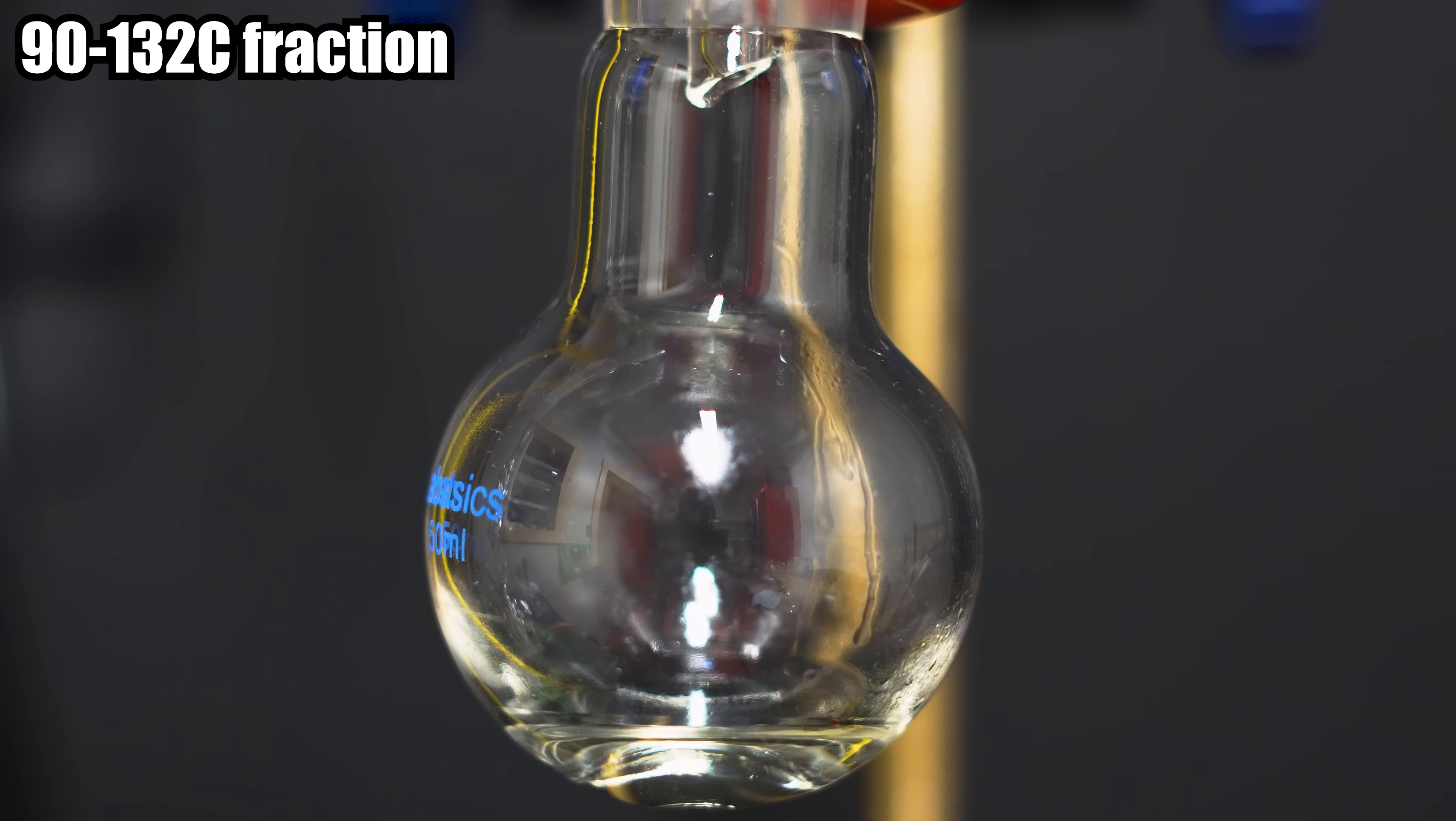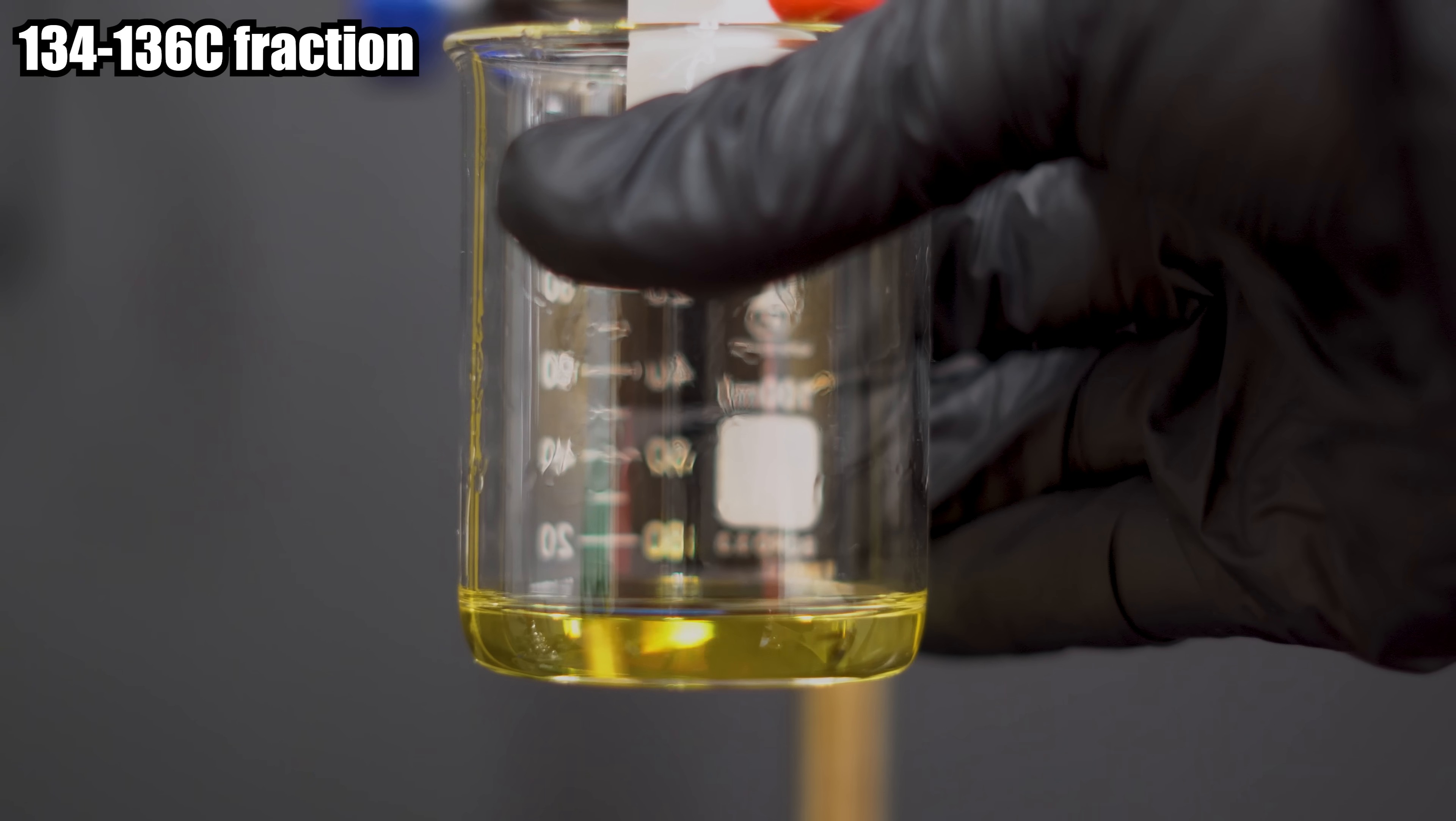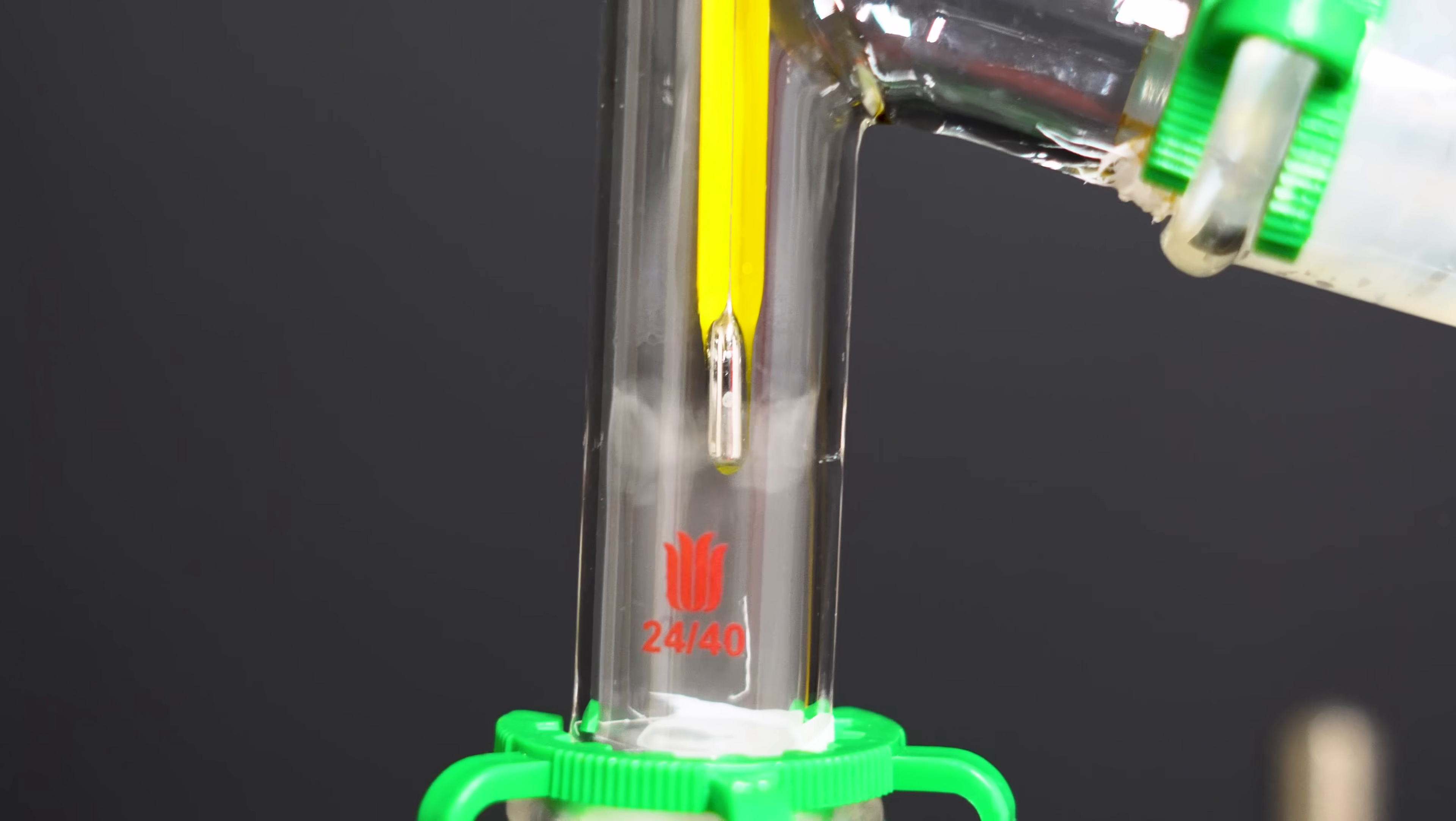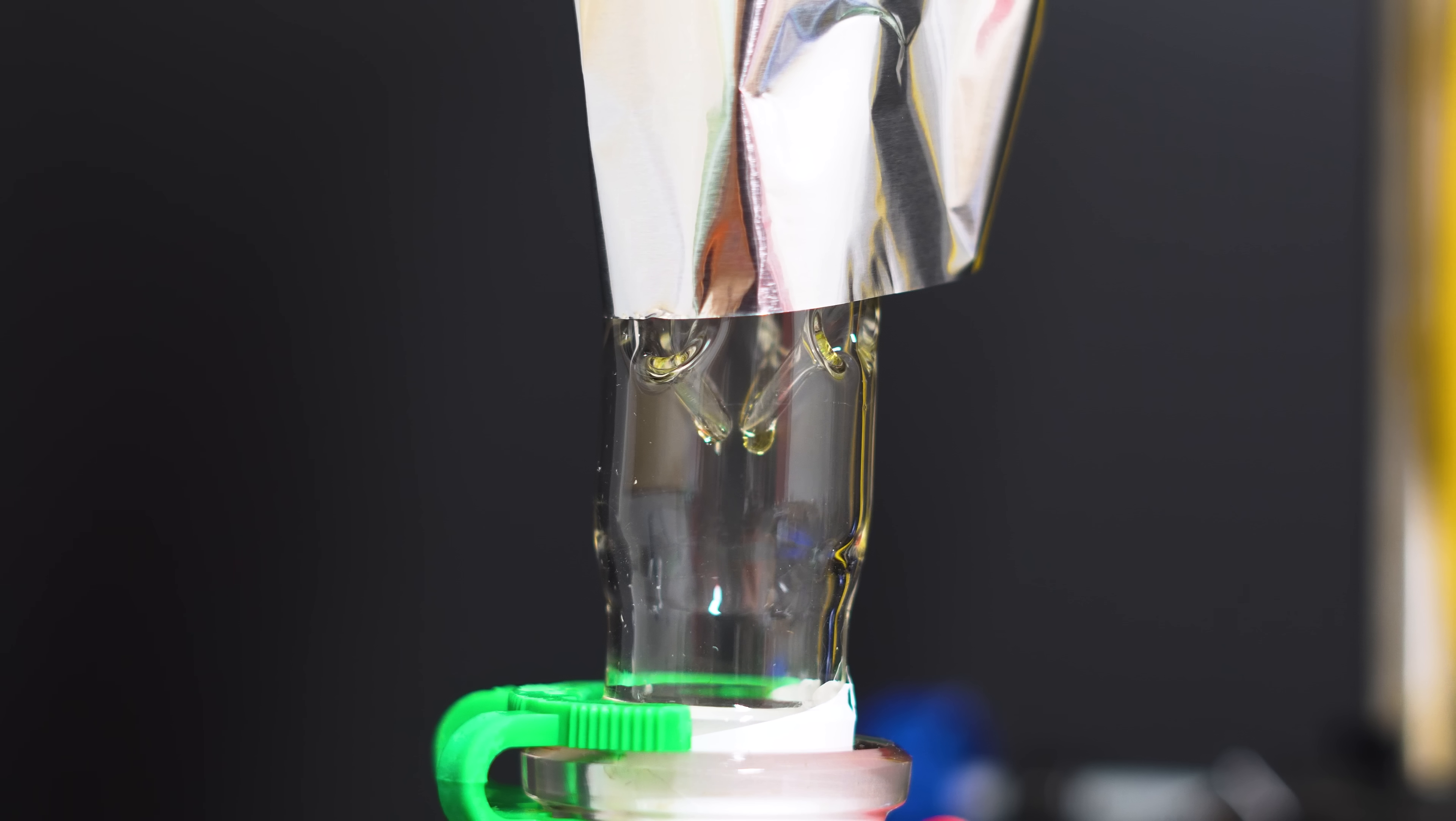I decided to keep this fraction as there could be a little bit of DMAE in this. The second it hit 134 degrees Celsius, I started to collect the DMAE product. This made me really happy as the regular distillation never got up to 134. Near the end of the distillation, it actually had a lot of problems getting it up the condenser.